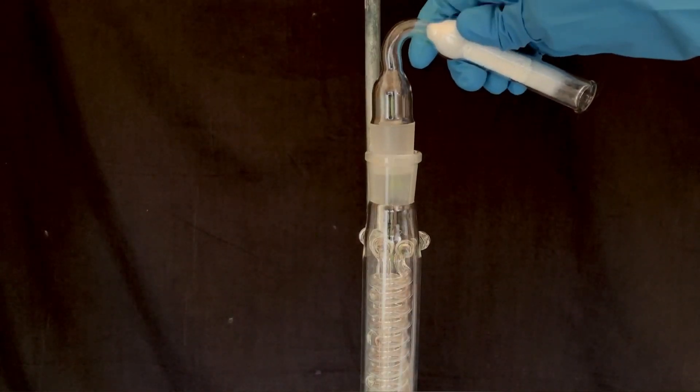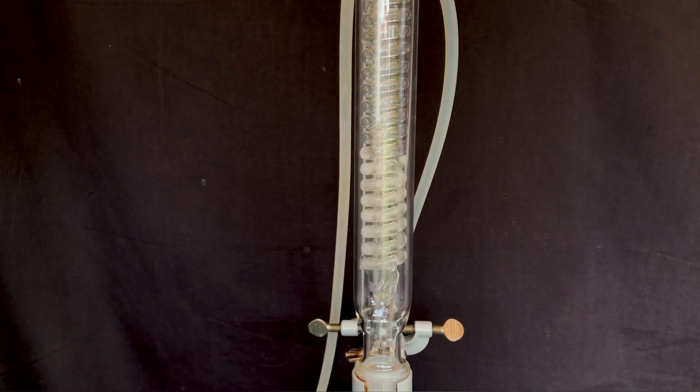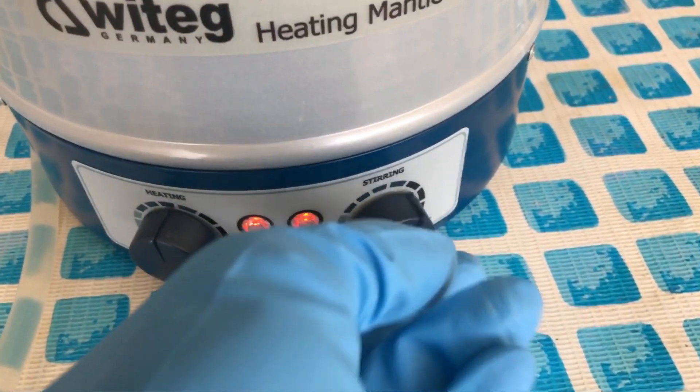The flask was then placed into a heating mantle and the reflux condenser was attached. Water would hydrolyze our product, therefore a calcium chloride filled drying tube was attached to the top. In order to begin with the actual preparation, the reflux condenser was flushed with water and heating and stirring were turned on.